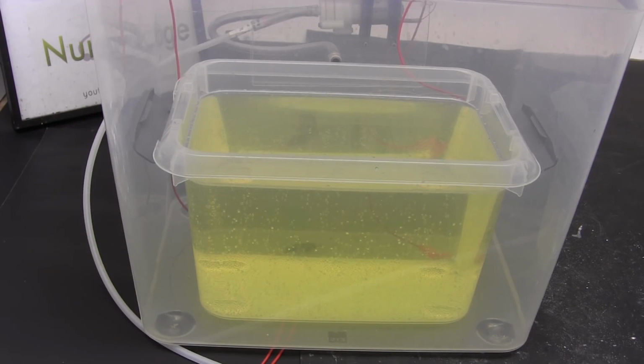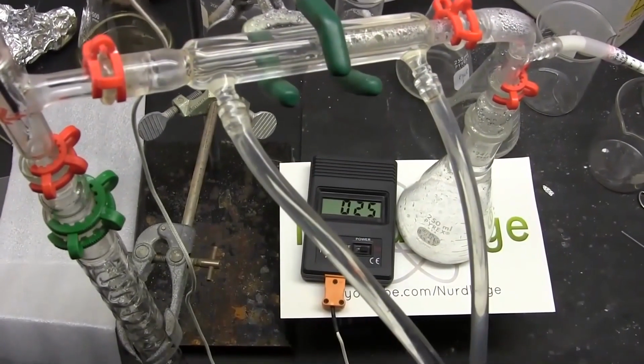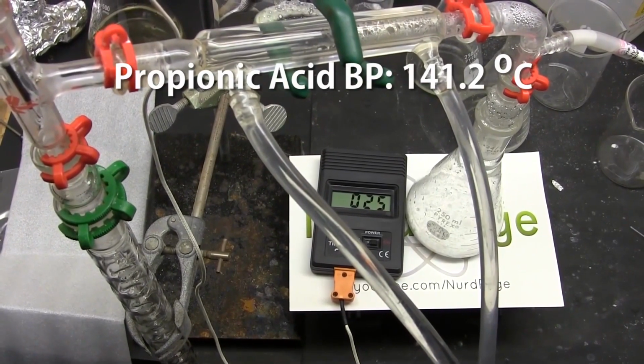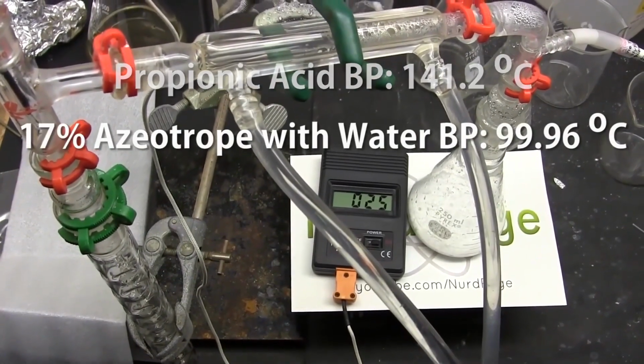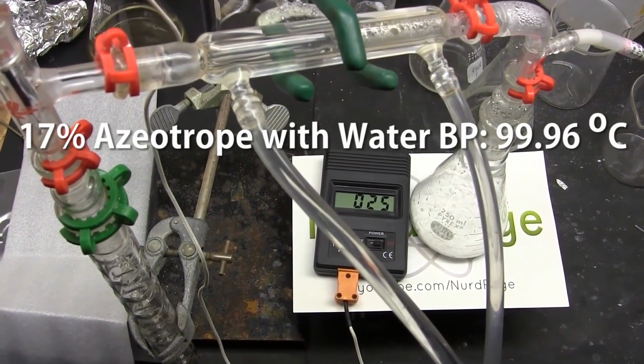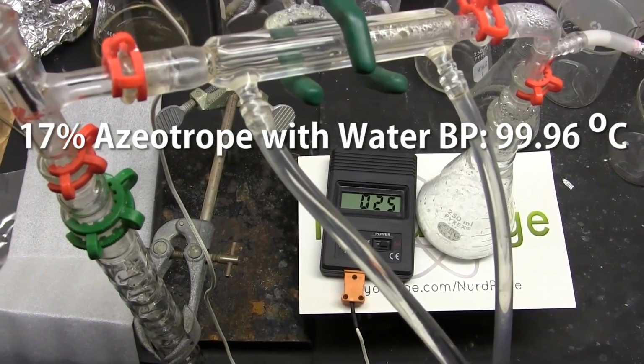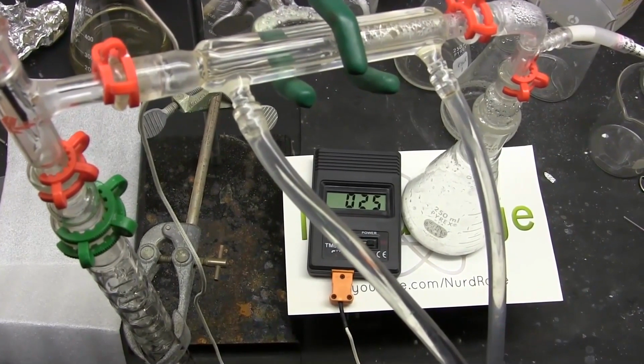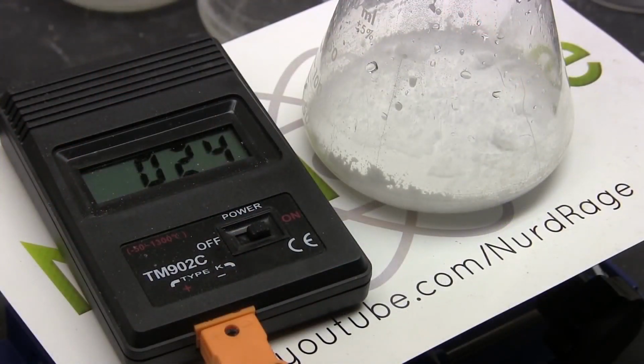Now, to recover the propionic acid from the salt water, we use fractional distillation. Pure propionic acid has a boiling point of 141 degrees Celsius. Unfortunately, propionic acid forms an azeotrope with water consisting of 17% propionic acid by mass at 99.96 degrees Celsius. We're just going to collect everything at 100 degrees Celsius. A lot of that should be the propionic acid azeotrope.